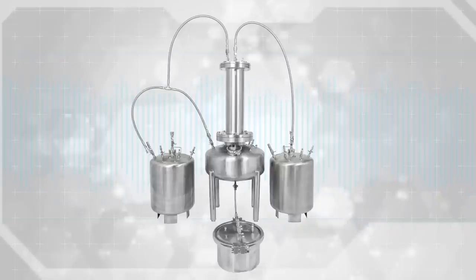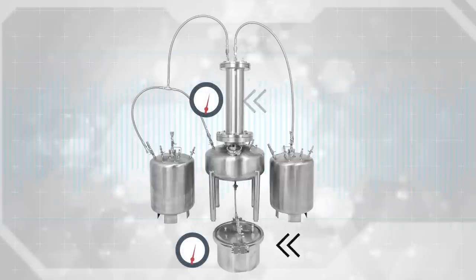Step 8: Resealing and pressure checking any open tanks. Any open tanks will need to be pressure checked again. This will be the sucker tank once cleaned and resealed and the column once filled and resealed. They are pressure checked again each time because those are the tanks that have had their seals broken. If you do not drain your extract out of the extractor tank into your sucker tank, you will need to reseal that tank and pressure check it after removing your extract from the extractor tank. Choosing not to drain your extract from the extractor tank into the sucker tank is not recommended for safety reasons as well as inconvenience, time, labor, and overall cost.